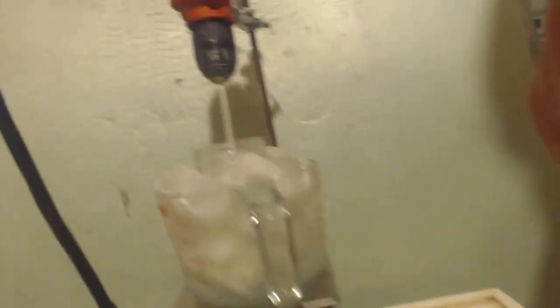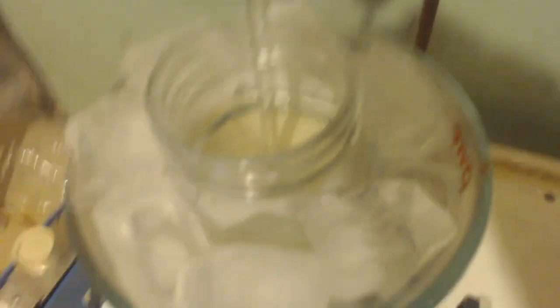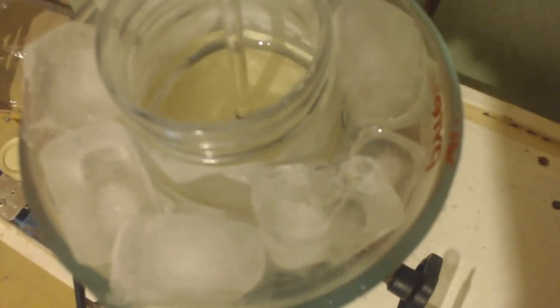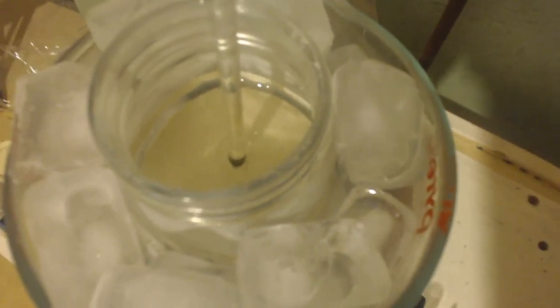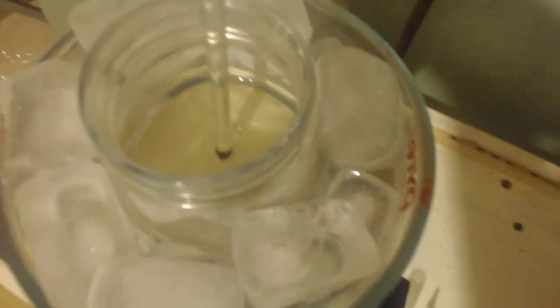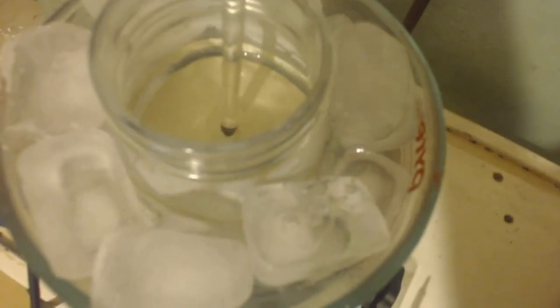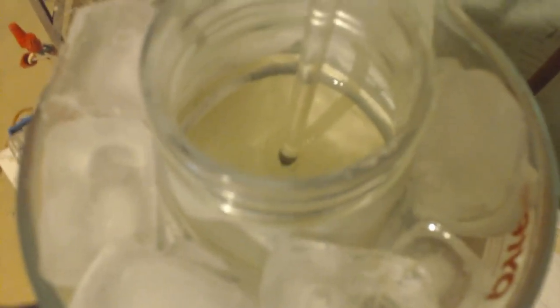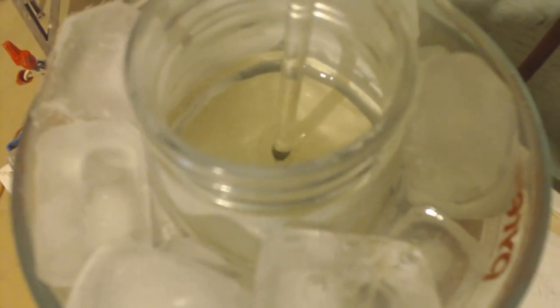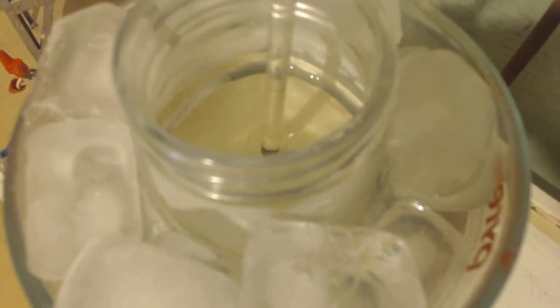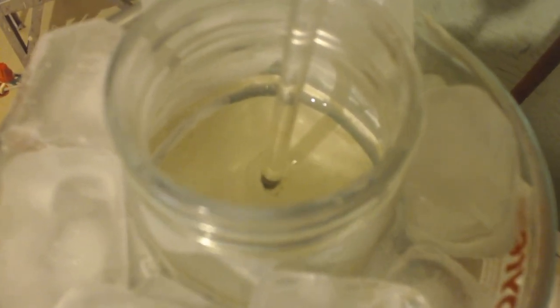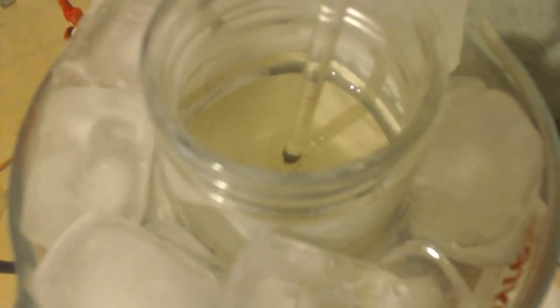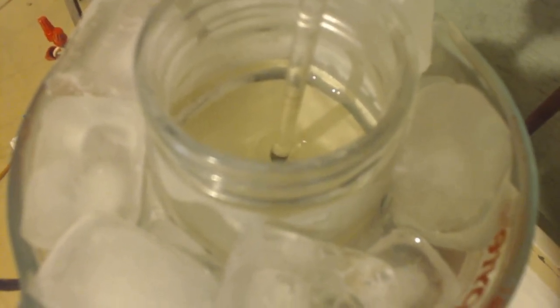I looked up to see what color silver bromide is and it's an off white yellow, a slight yellowish whitish color. I thought it was gray. The last experiment I did, I think I put too much light on it and that's why it turned gray, turning some of it into silver and bromide. Because this isn't really turning gray this time. It's still staying a nice yellow.